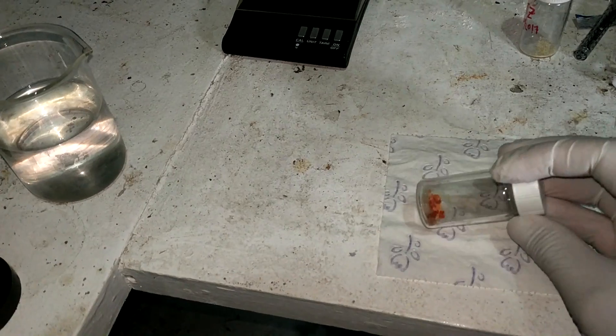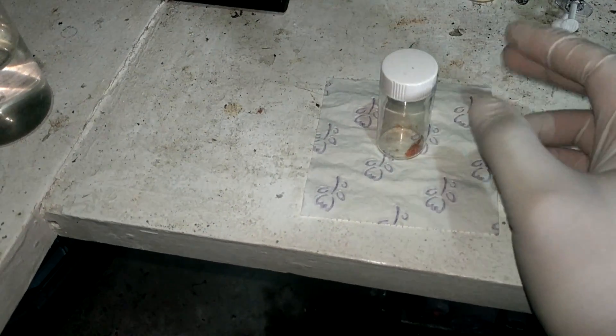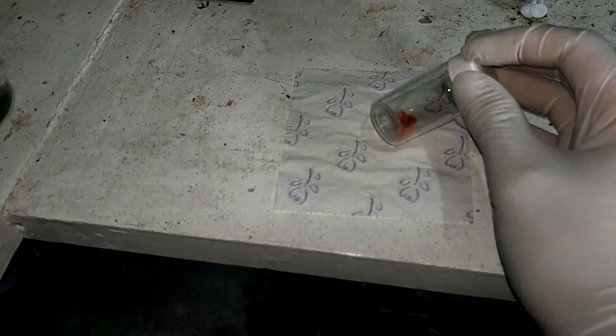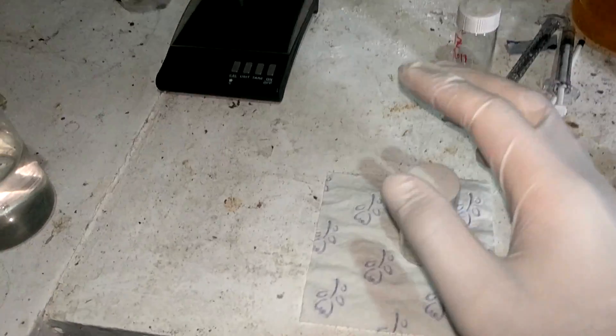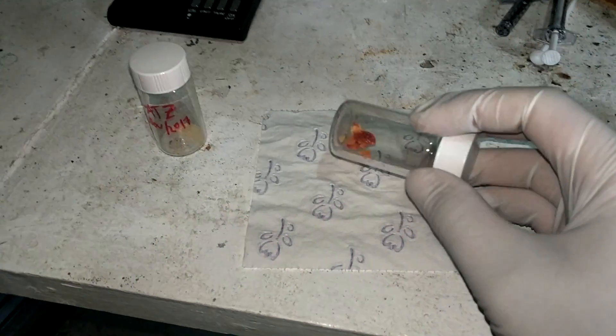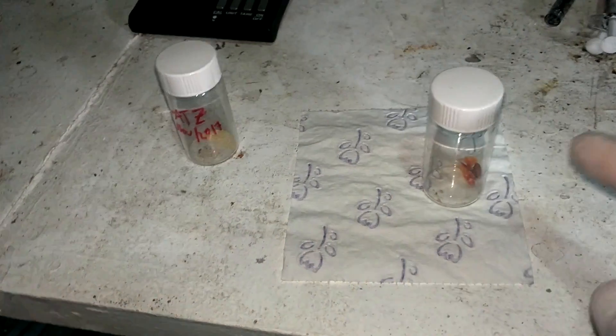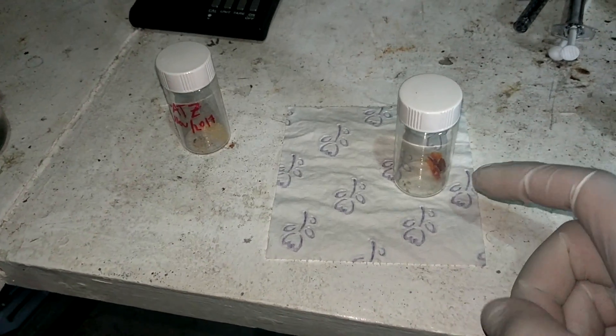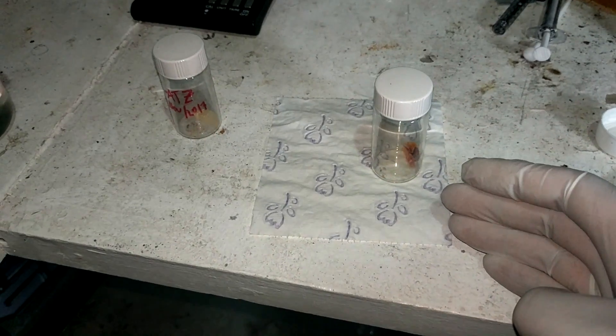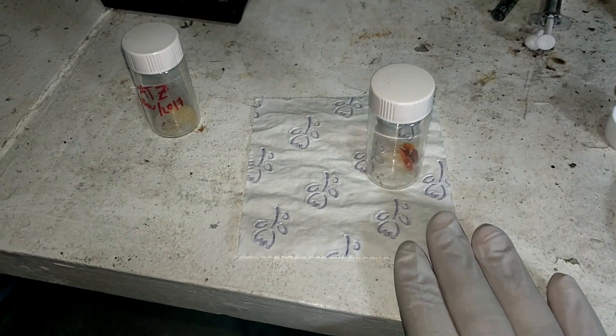All right. So this is our final yield here. It's 580 milligrams of the isocyanogen tetrabromide. Which isn't a high yield. I didn't really cash in one of my high yield coupons for this experiment. We only got 42%. Obviously I've speculated before about lack of bromine and the fact that it needs more heat. So perhaps if we heated it for another couple of hours, we could get another 50 milligrams or something like that. But I'm pretty happy with this yield. You might ask, why am I not bothering to do any purification techniques? It seems a little slack. Well, I asked myself the question, do we actually need to do this purification? Like just if we're turning into the tetra-azide product anyway. Like maybe we could just use a crude product and turn it into the tetra-azide. And well, I've already taken a small amount out and it works.